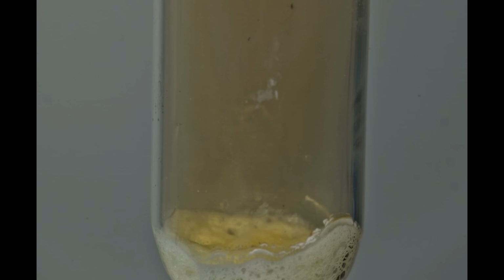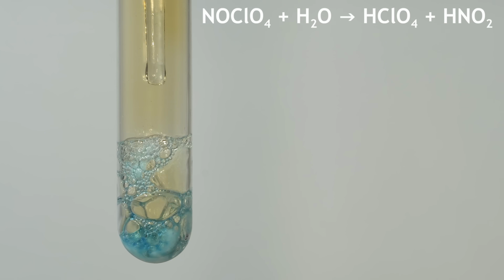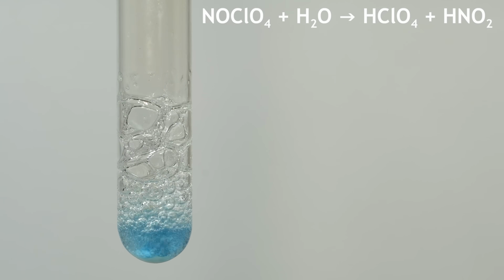Like other nitrosyl salts, nitrosyl perchlorate hydrolyzes immediately upon contact with water. Since it's a mixed anhydride of nitrous and perchloric acids, adding water converts it into these two acids. The blue color in the solution is due to the formation of nitrous acid.